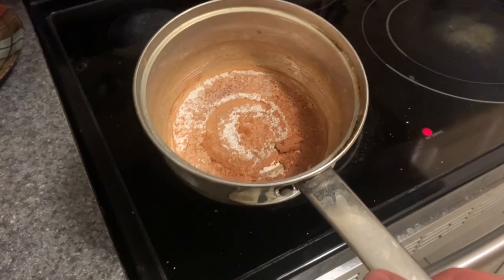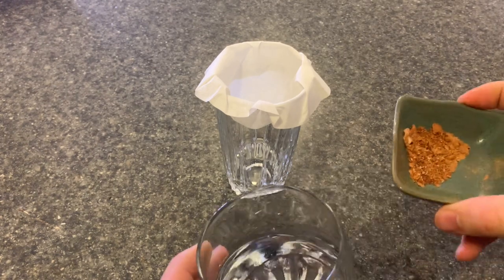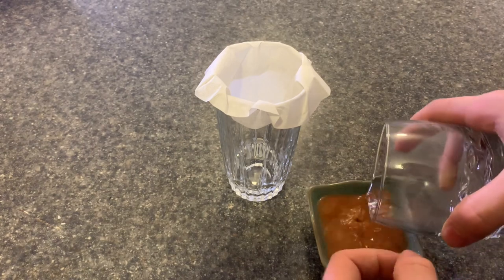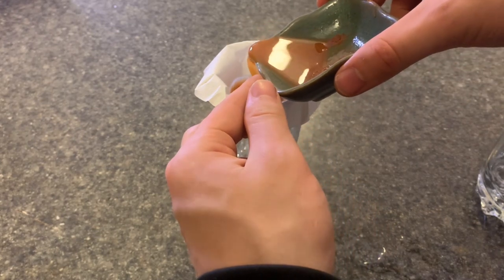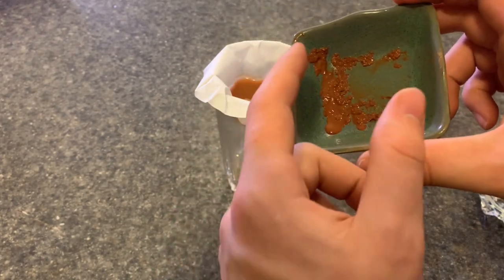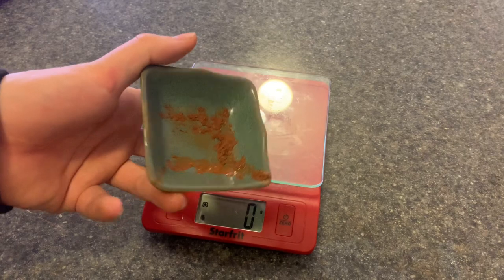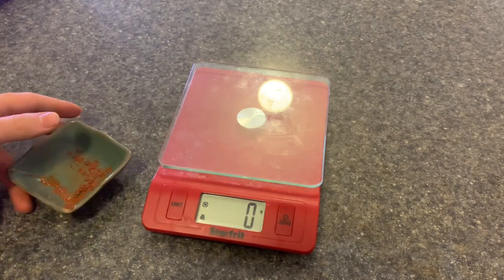Let's scrape off the iron oxide and see how much I managed to get. The iron-oxide right now is extremely impure. How I will choose to purify it — removing the salts and other stuff — is to pour a bit of water into this cup and dissolve everything which can be dissolved: salts and other types of stuff. Then I will pass it through a filter. All of the very insoluble iron-oxide stuff will be left over here, but all of the liquid will just pass through. In the end, I didn't manage to get much — roughly this much iron-oxide. It's definitely not much, but as you can see, it's quite pure and very much oxidized.